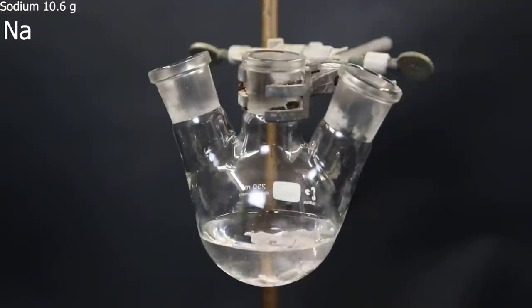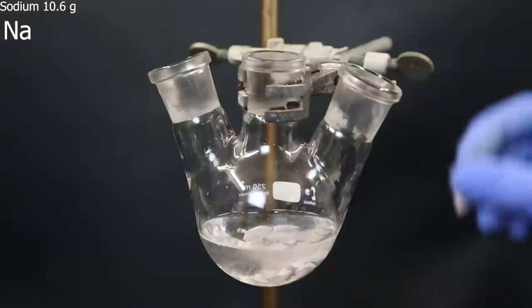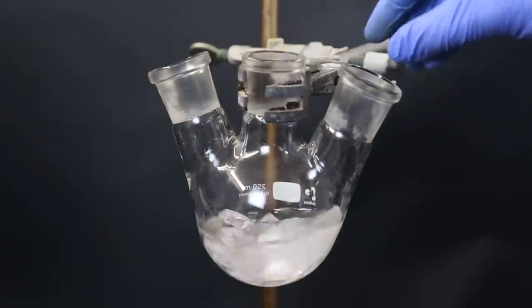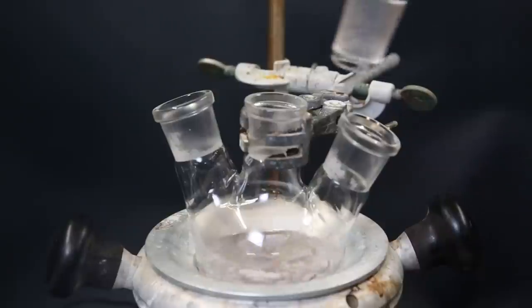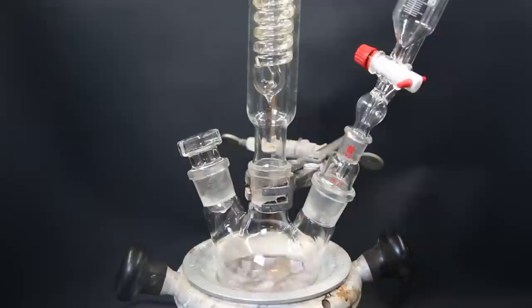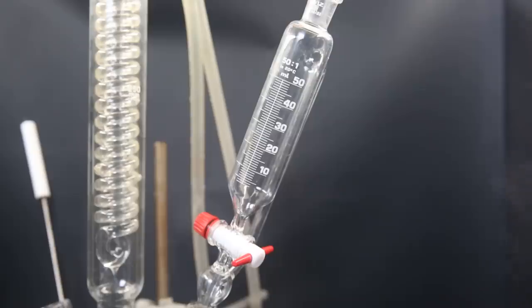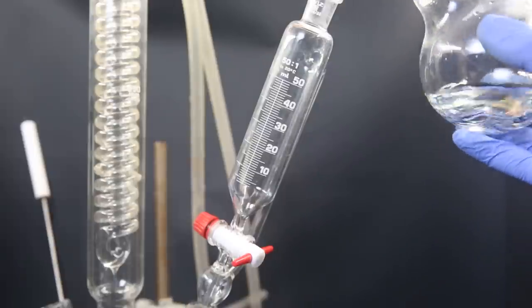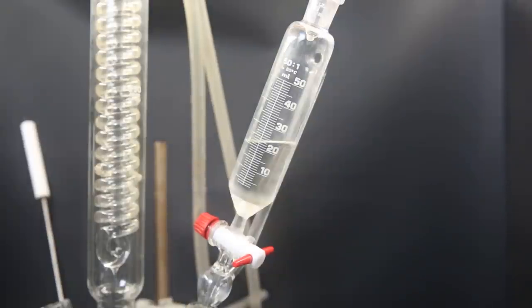The sodium starts to give off small bubbles of hydrogen gas, because of traces of water that are present in the benzene. I then add a stir bar, and move the flask to a heating mantle. I attach a Dimroth condenser, and then stopper the left neck. Then to the right neck, I add a small dropping funnel. Now to this dropping funnel, I quickly add in all of the arsenic 3 chloride chlorobenzene mixture. When it has all been added, I stopper the dropping funnel.